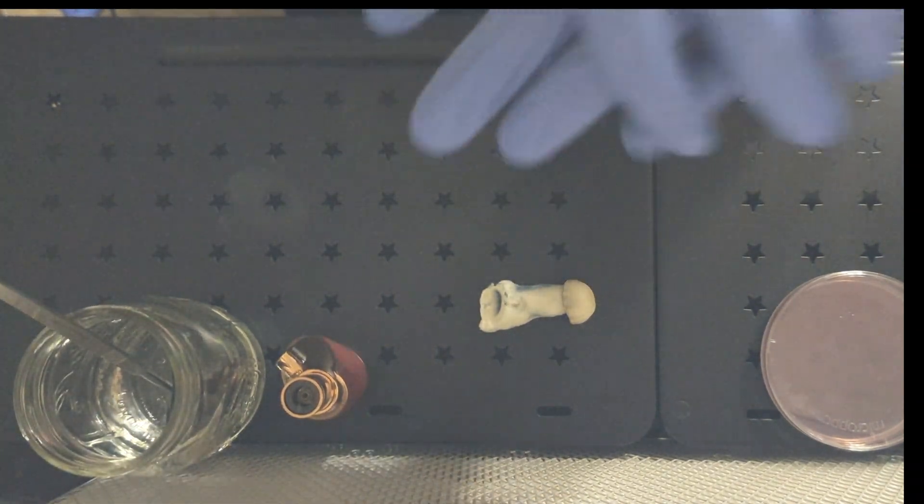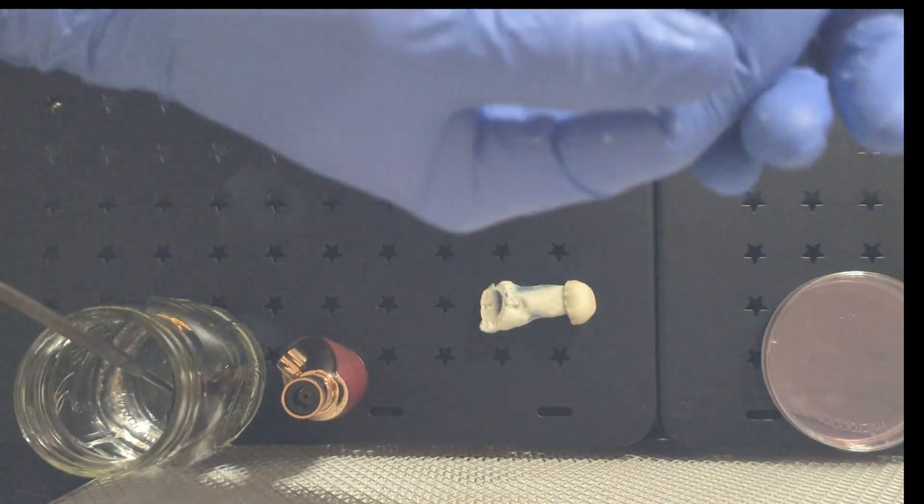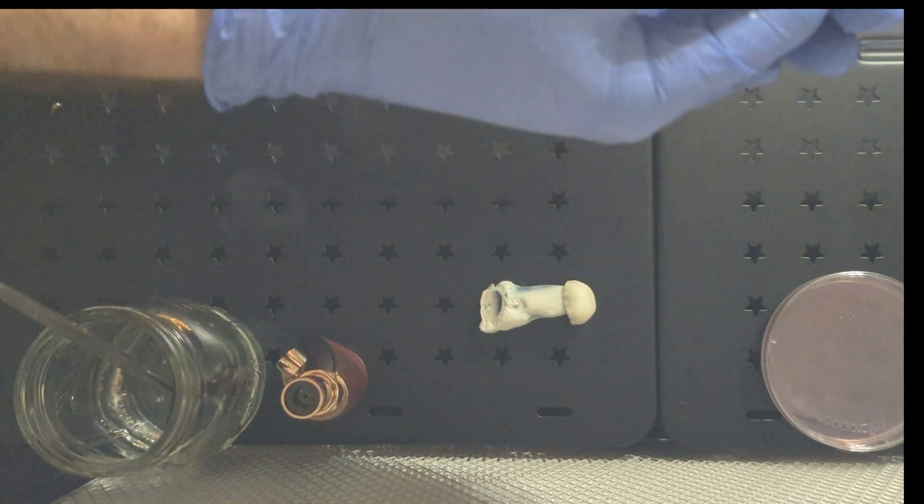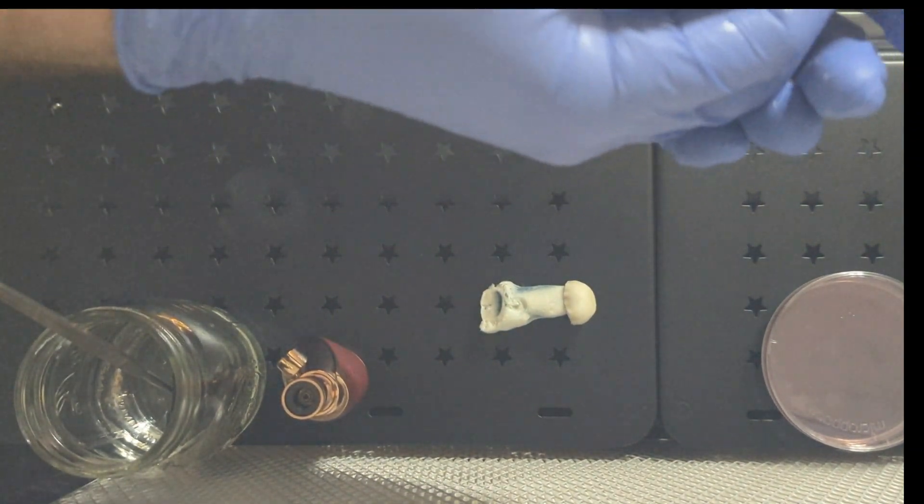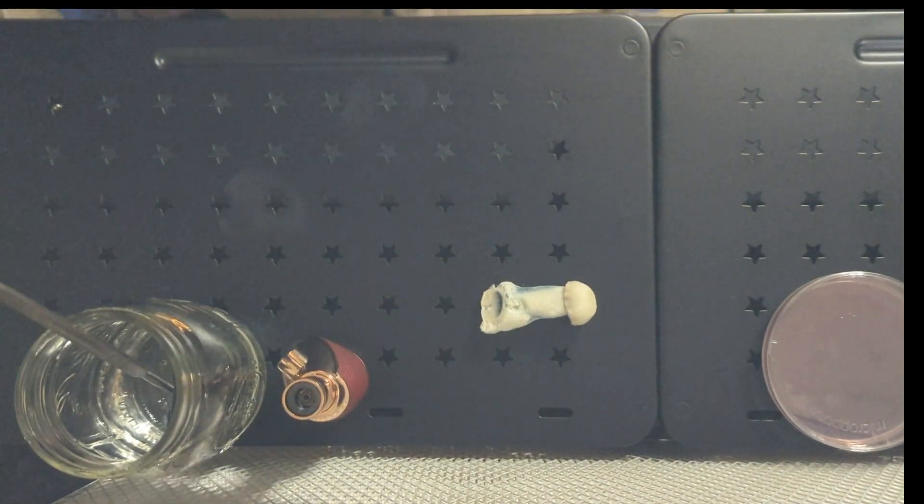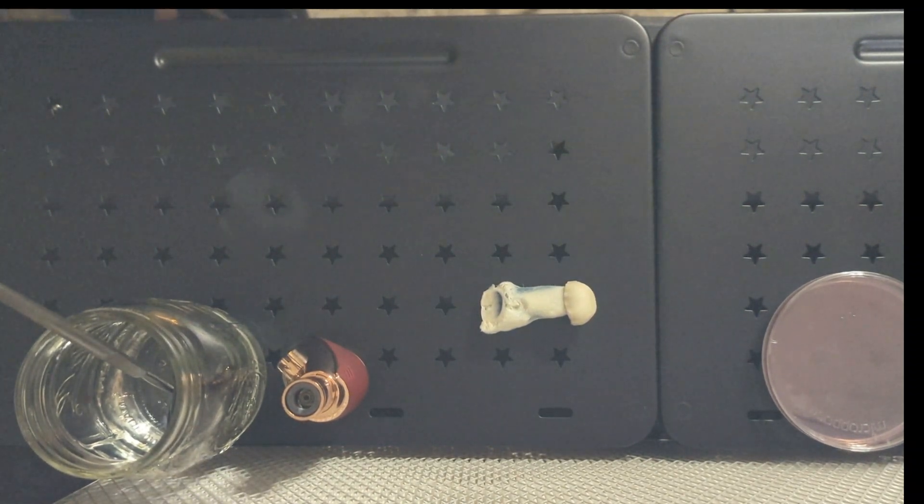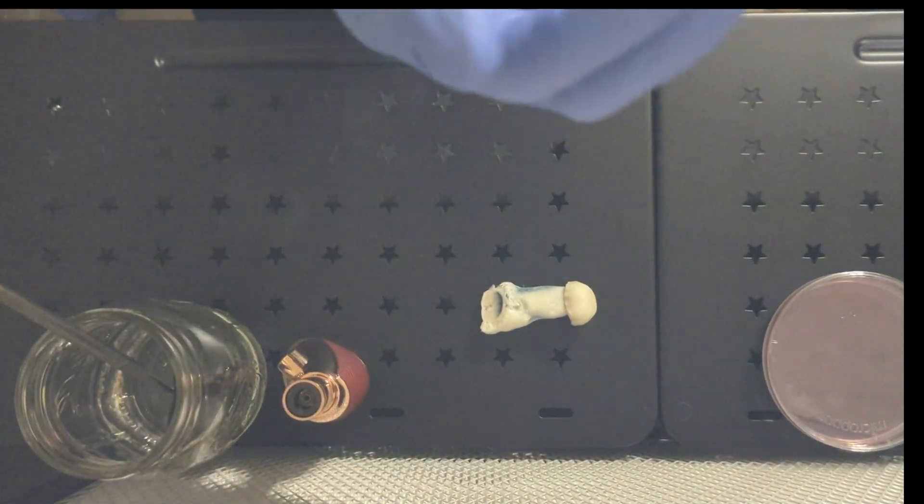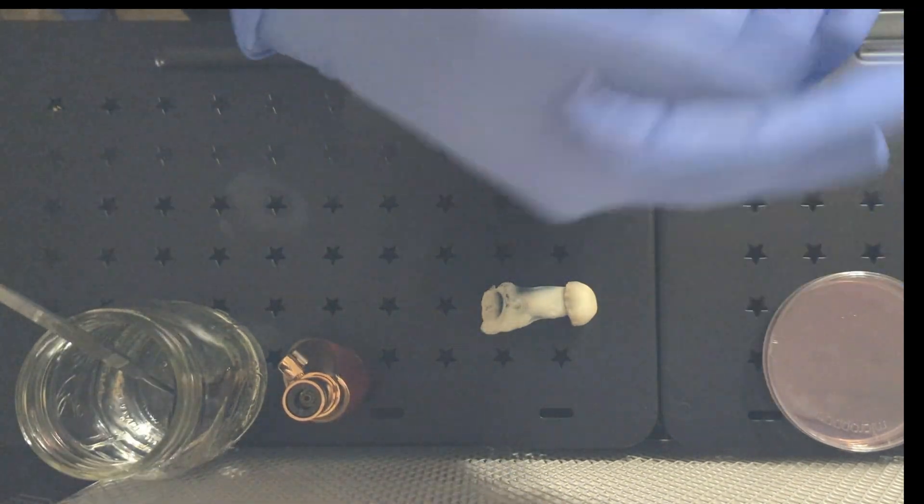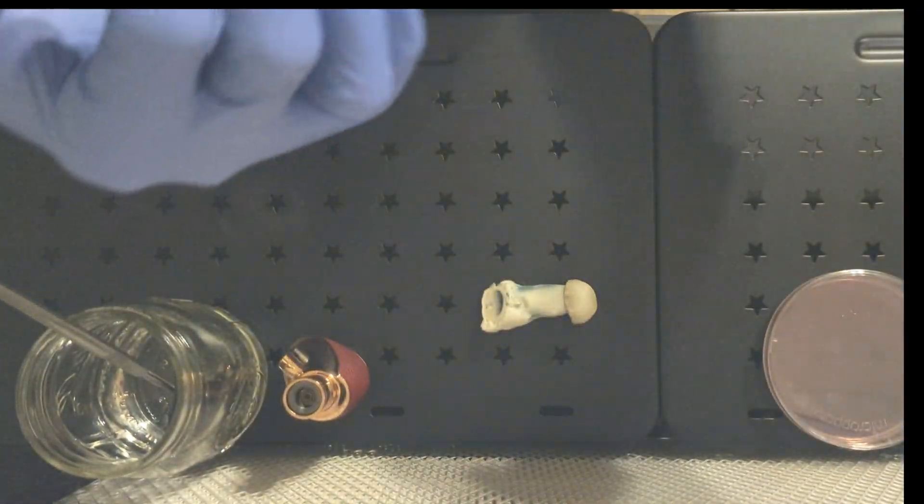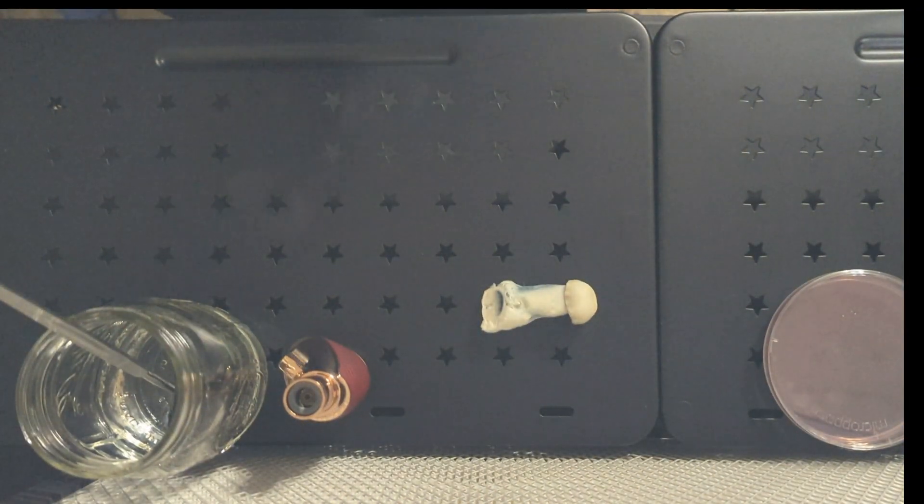Make sure whatever your workstation is, it's clean and sanitized. To start, you need to select a mushroom. You want to make sure it's clean, there's no contamination on it, there's no slime or any other kind of mold or bacteria growing on it.